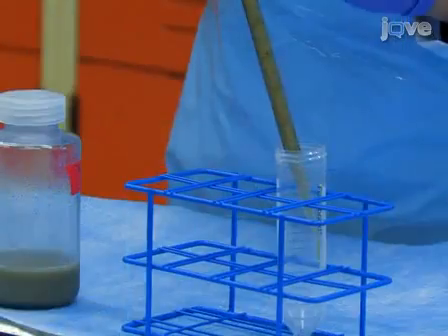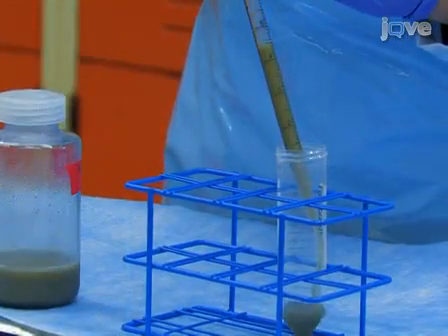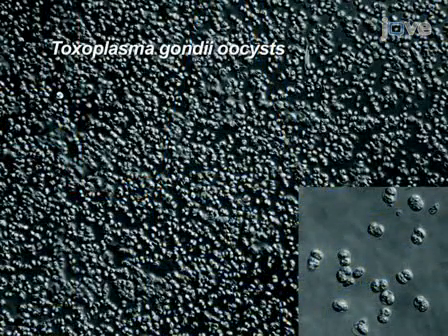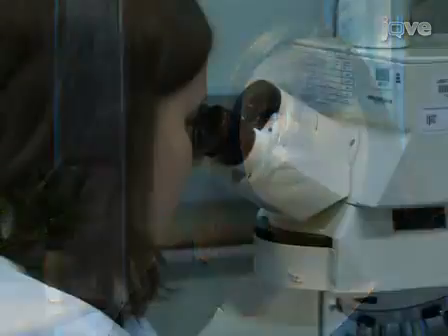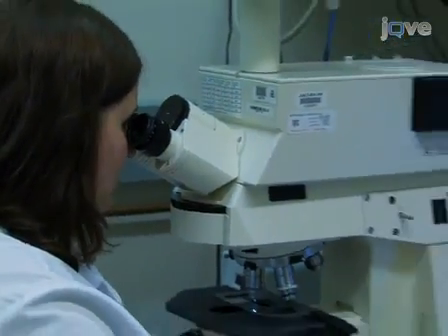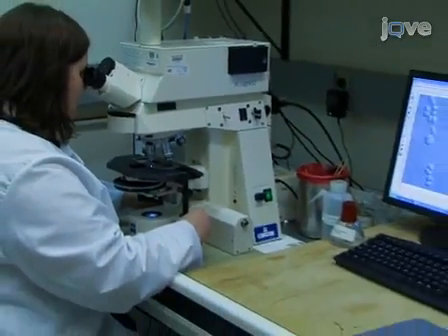Hi, I'm Dr. Sarah Staggs, an employee of Dynamac, a contractor for the National Exposure Research Laboratory of the U.S. Environmental Protection Agency. Today we will show you a procedure for purifying Toxoplasma gondii oocysts from the feces of laboratory-infected cats using a discontinuous cesium chloride gradient. This procedure is routinely used in our laboratory to isolate oocysts for use in molecular biology and tissue culture experiments. So let's get started.